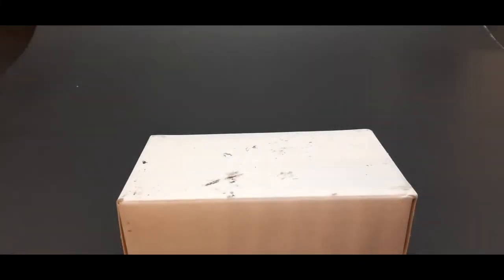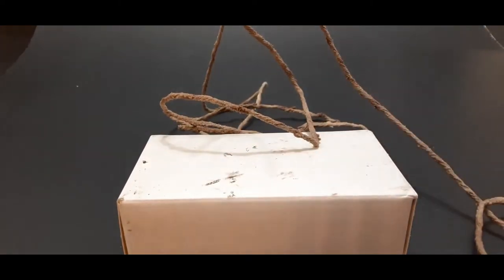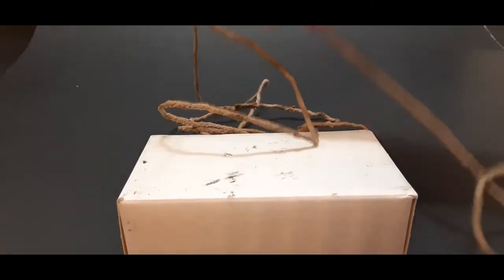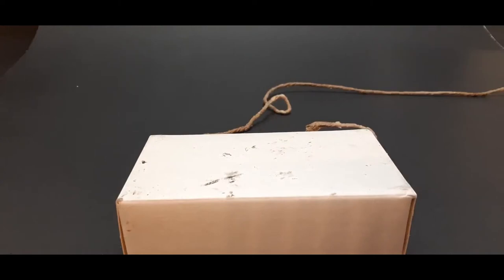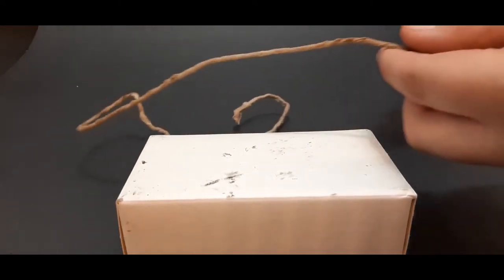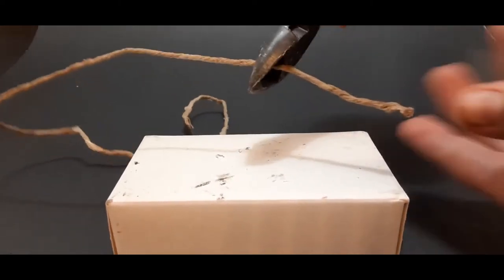Once all of this is finished, I added a little bit of rope here onto this paper and we're going to test it. As you can see, it browned up, but this is simply the oxidation of the nitric acid that's been on the rope. This is okay and won't do anything bad for the actual chemicals.